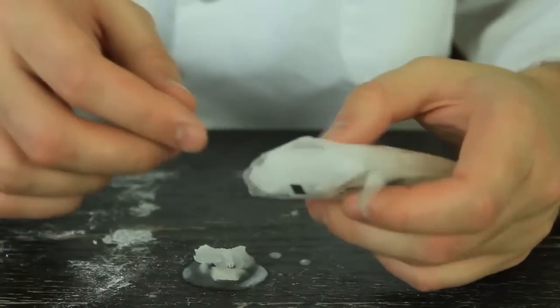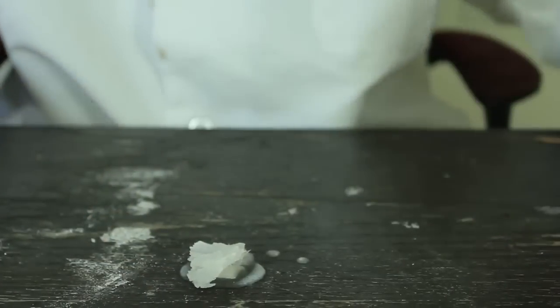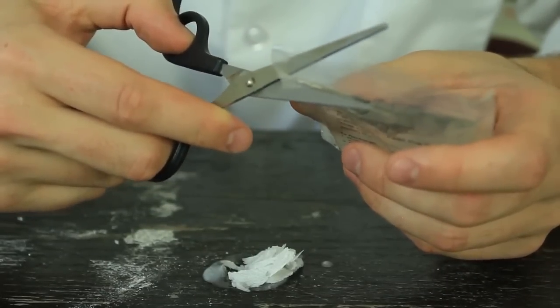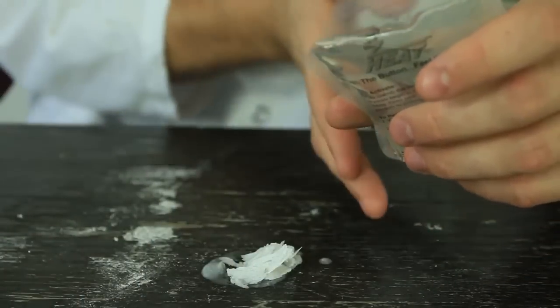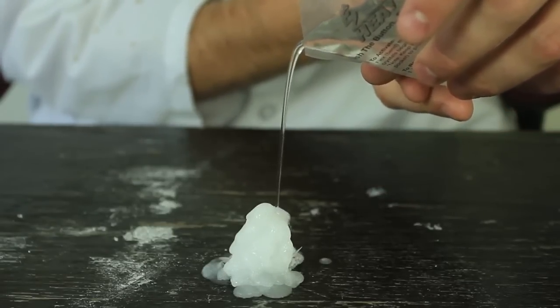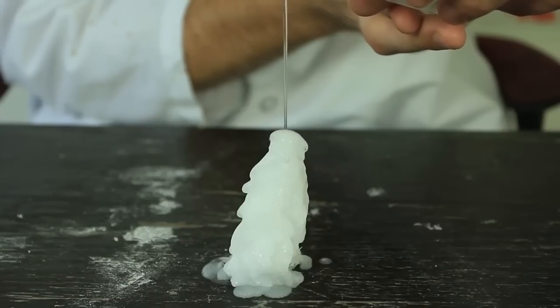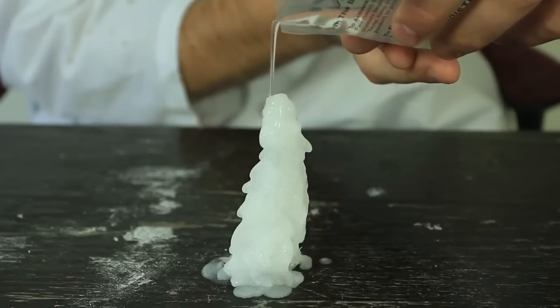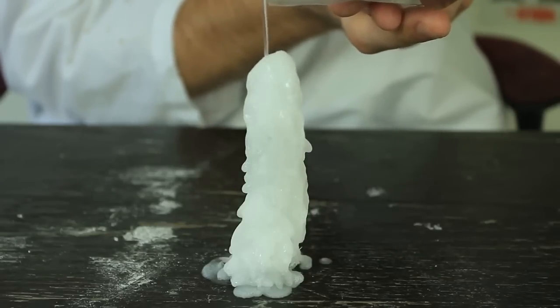Now I'm going to put it in here — experiment with sodium acetate and water. What do we get from sodium acetate? An easy heat hand warmer. So here's a used one — what I did is open it and grab a piece out of it, put it in here like that, then cut it right here. And look — you see how carefully I cut it. And now it just crystallized right away and this thing is super hot and warm.